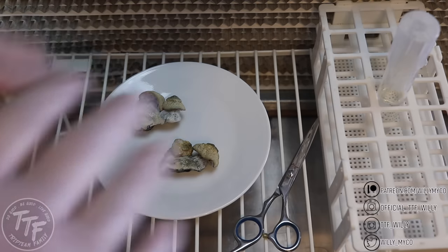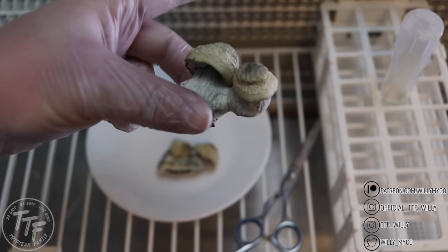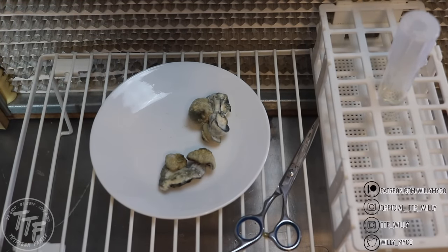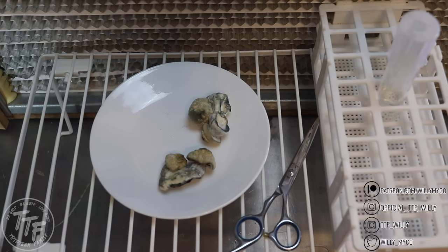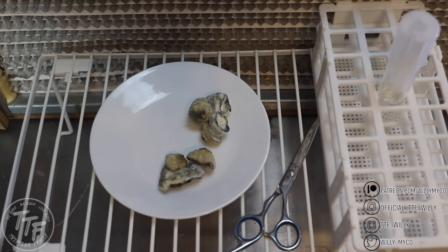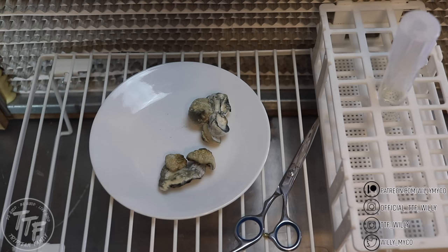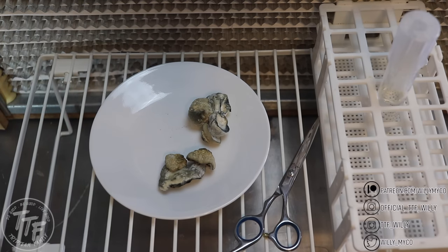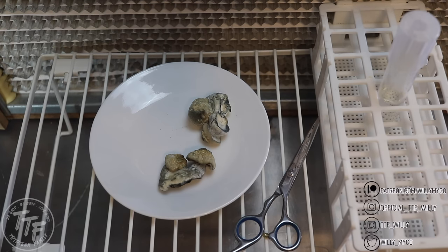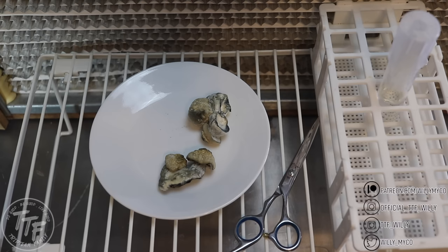We play the numbers game — the more plates we make, the higher the chance that one will reanimate and we can get mycelium growing again. Over the past year I've been testing different ways of doing this, and really the best way is the simplest way. Here we are in front of the flow hood. I have the sample dehydrated fruits purchased from Whole Foods. A big thing comes down to how old the mushrooms are and how they were dehydrated — using air with no heat gives the highest success rate.